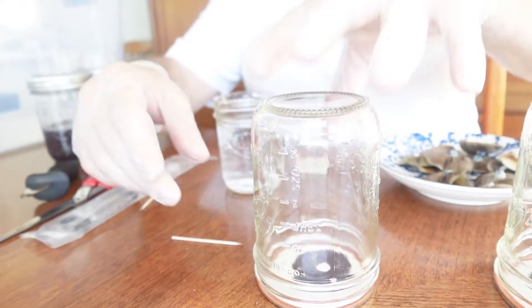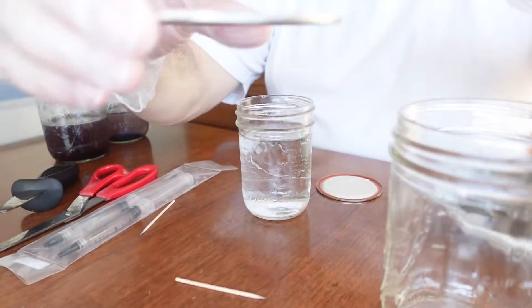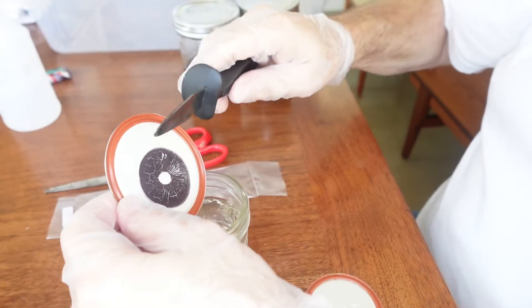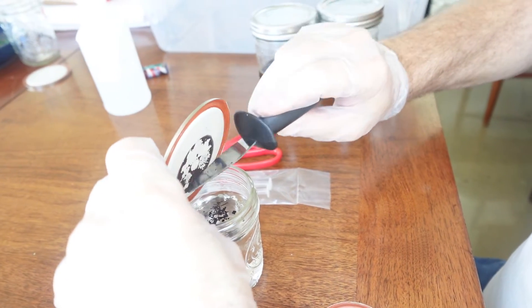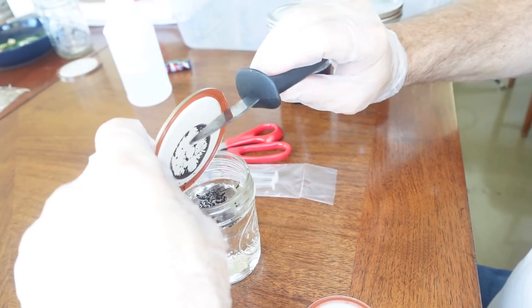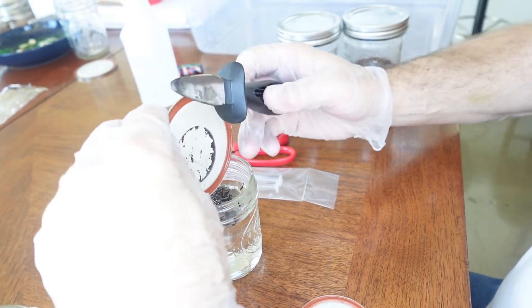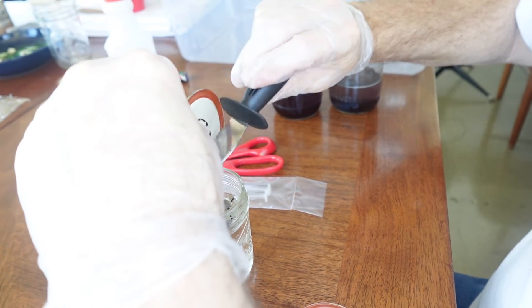Here's the water it's going into. I just take off the lid — look, that's nice and dry. I'll show you why I do them on these lids. Look how easily that comes off. It doesn't come this easily off of the aluminum foil, but it just comes off so fast and easy that I love doing them right on the lids.